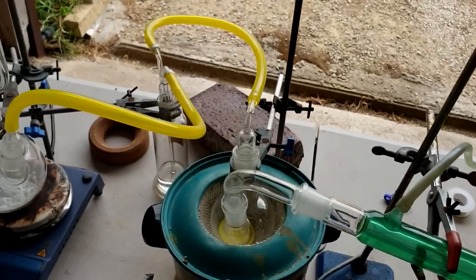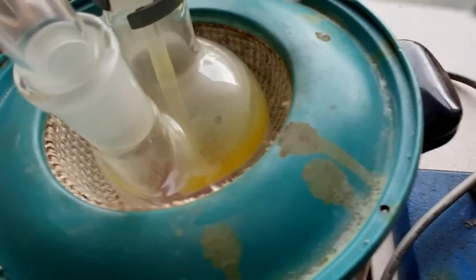Hopefully it works like that. It's a little bit touchy. It's starting to look pretty molten — flinging the sulfur everywhere. It's pretty cool.